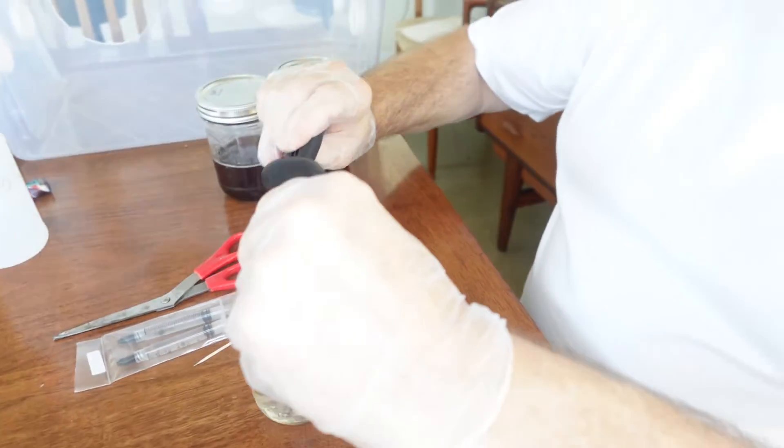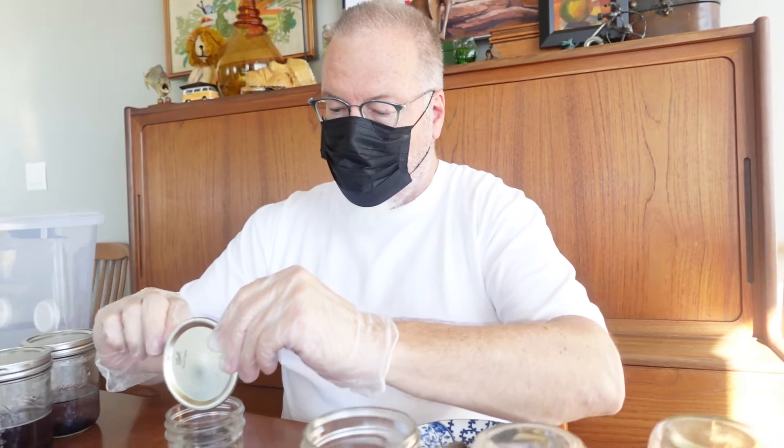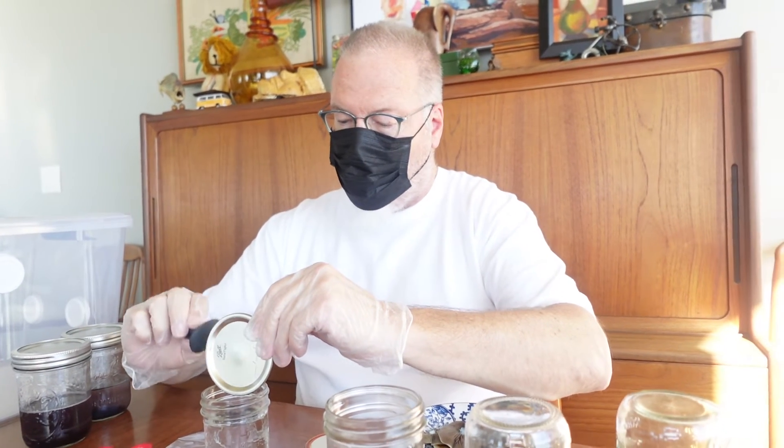So that's how you do it. And then let it sit in the water for a couple of hours. If it sits a couple of days, keep it cool and dark. Let the spores take up the water.